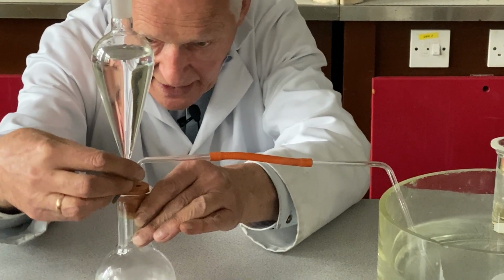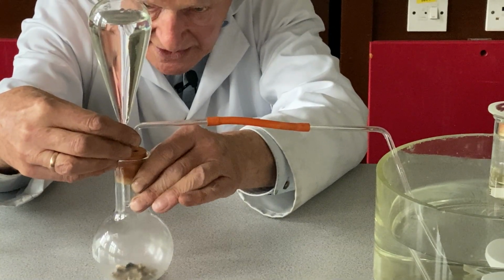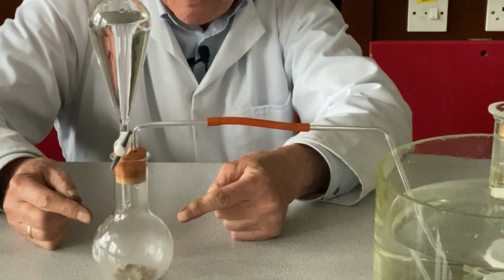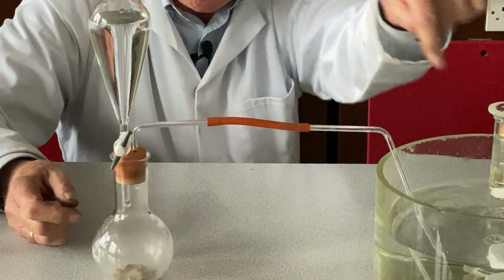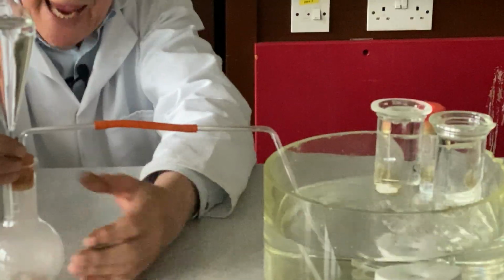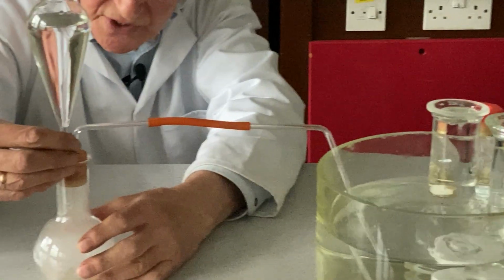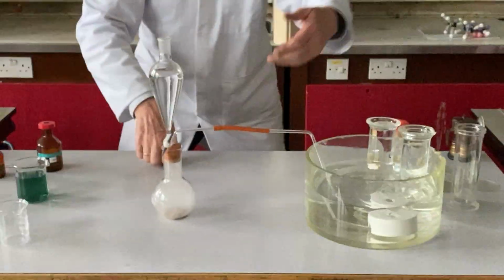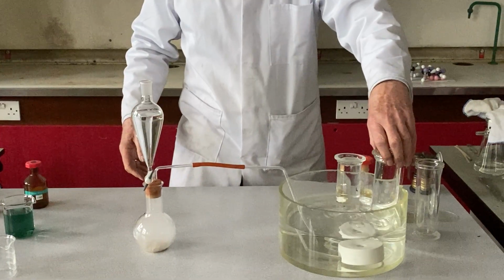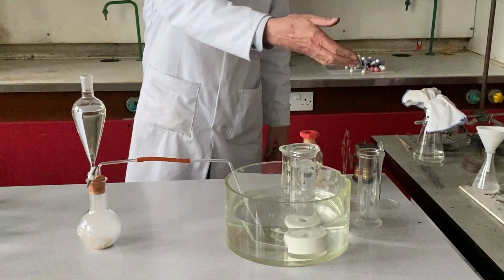There it is. And there, as you can see, bubbles will start coming out. There we are. We have a steady flow now of water on calcium carbide, which is reacting very vigorously indeed. And you can see bubbles here. Now, those bubbles initially are bubbles of air, because the acetylene is displacing air from the flask, so we allow a few of these bubbles to escape. However, judging that we've got rid of most of the air, we now start collecting in our beautiful glass trough here.